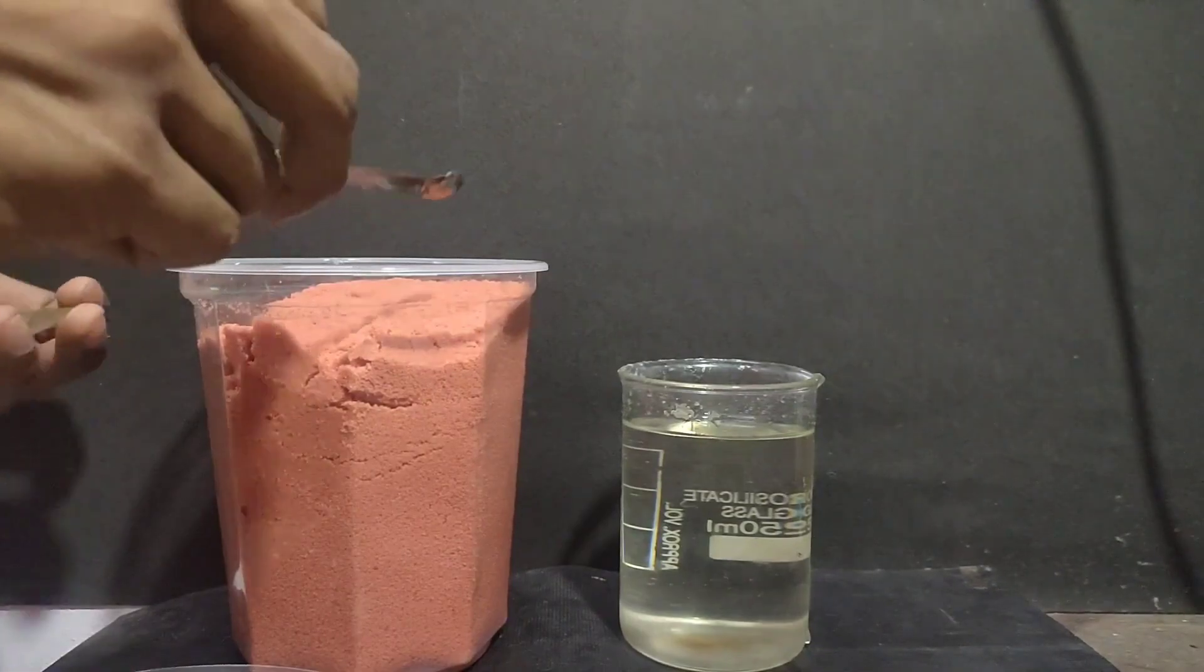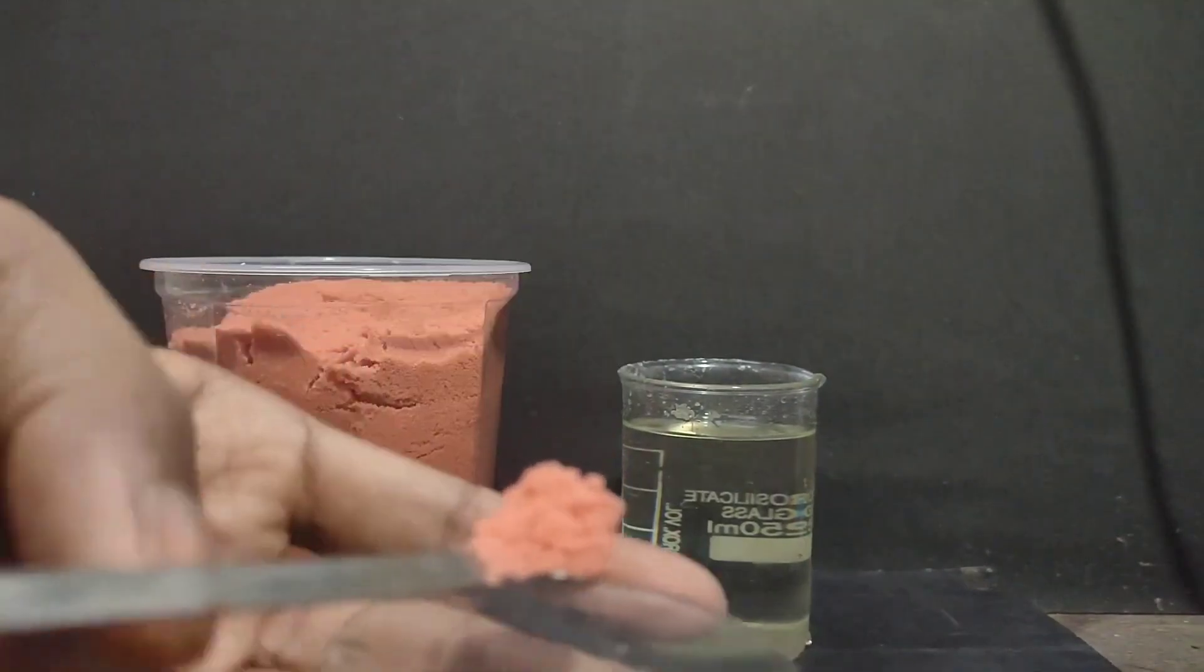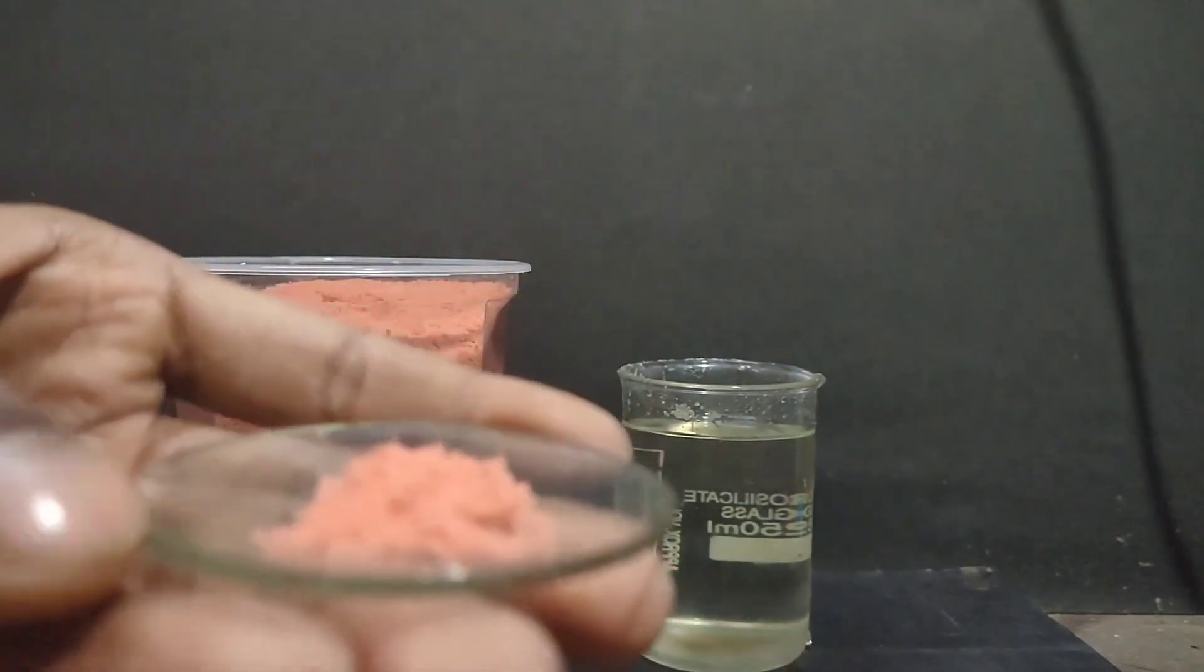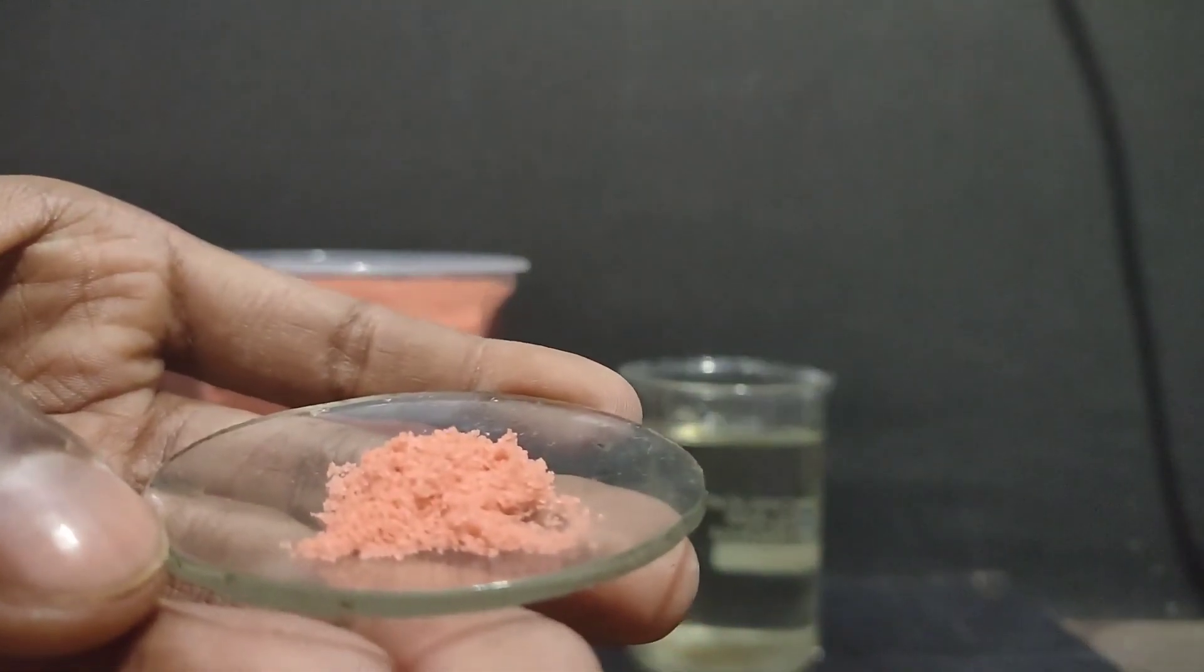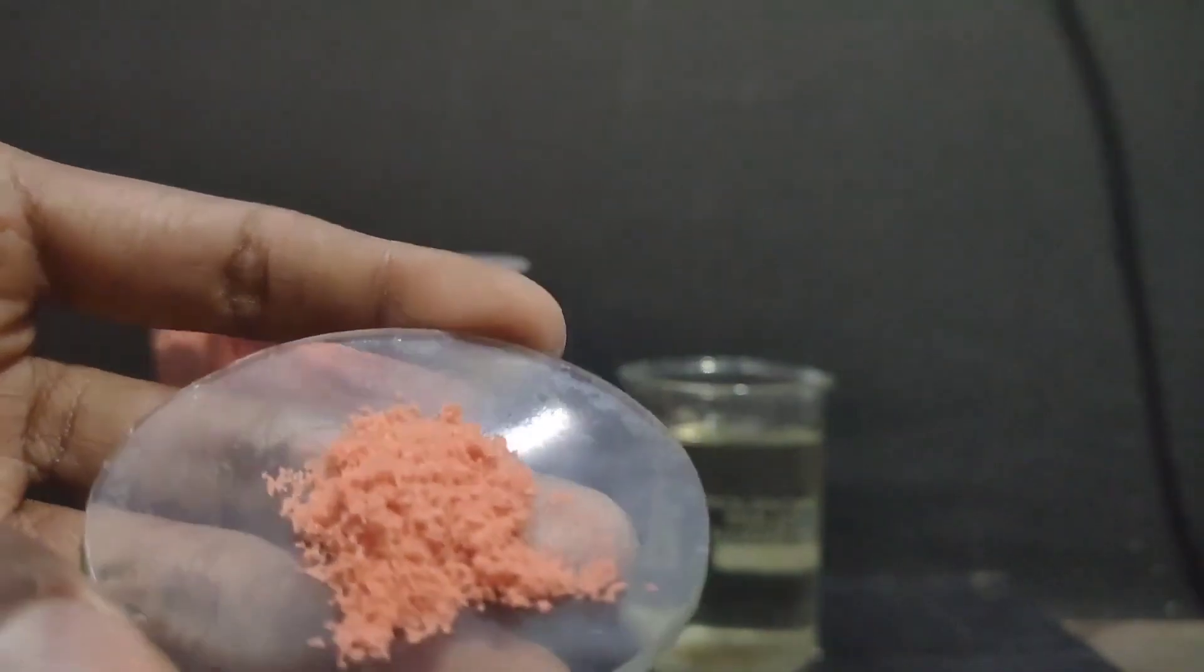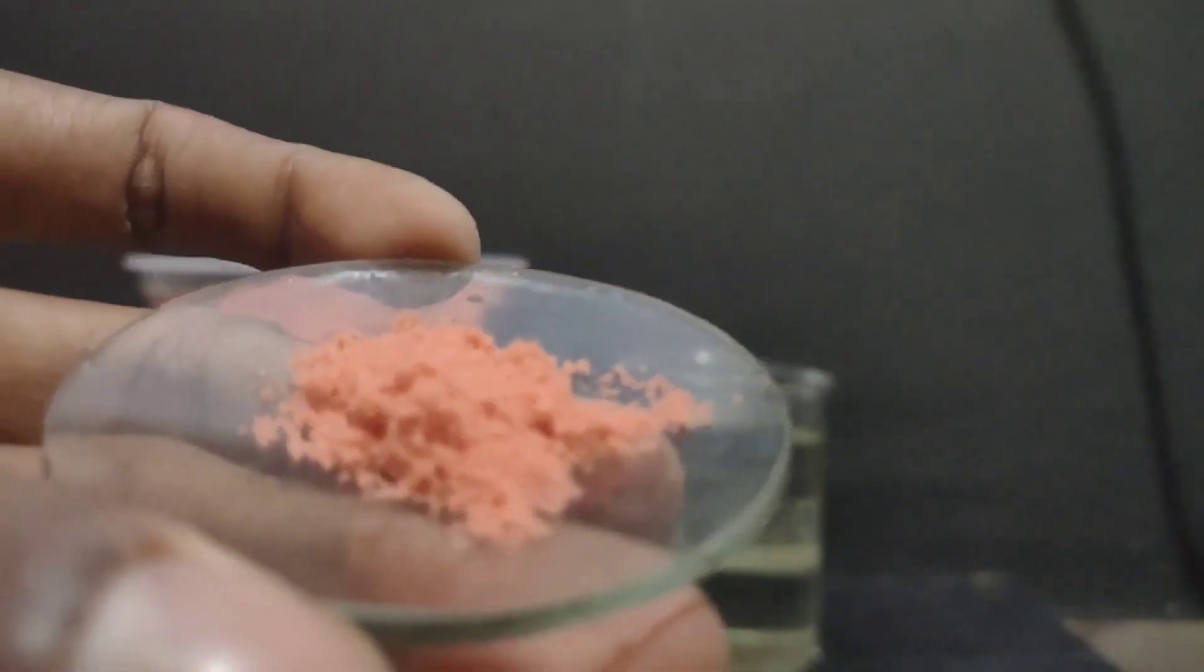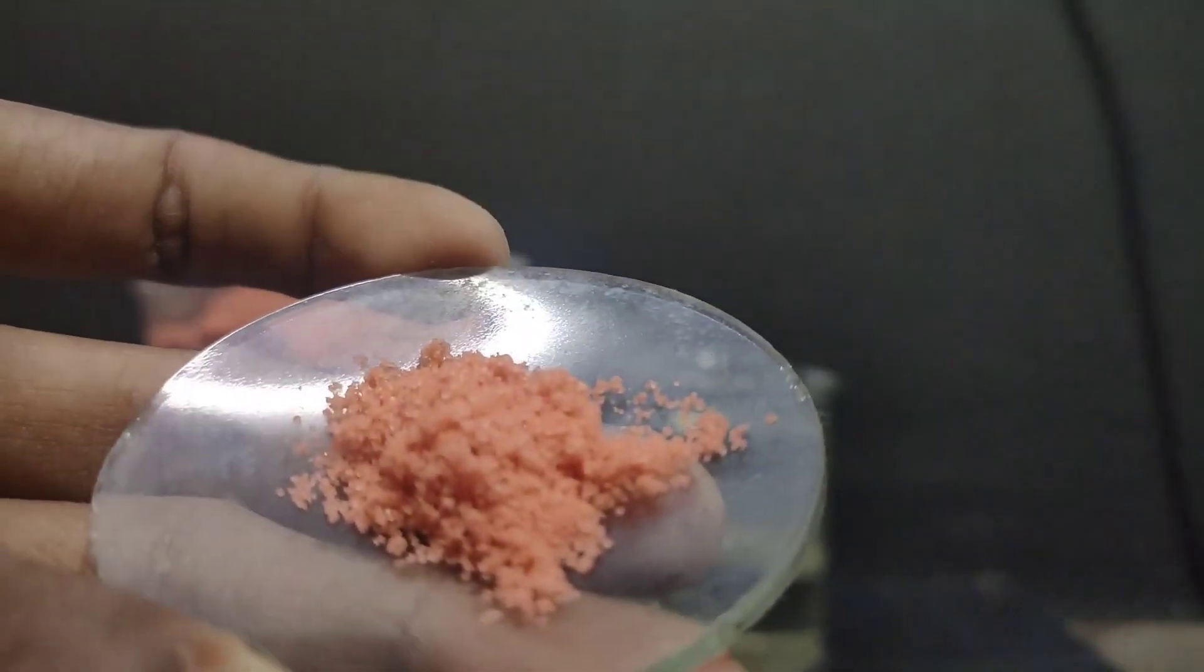I took some of this red colored crystalline salt and dissolved it in water to prepare a saturated solution. Then I filtered the solution so it came colorless and the red color remained in the filter paper because the color was insoluble in water.